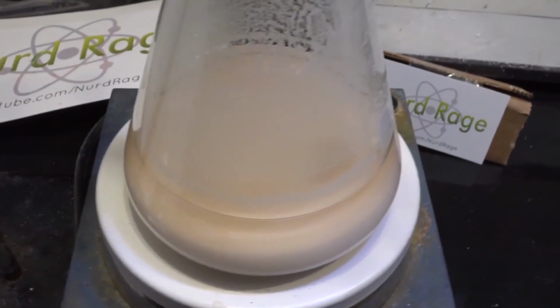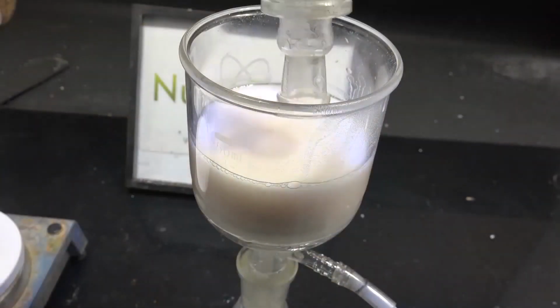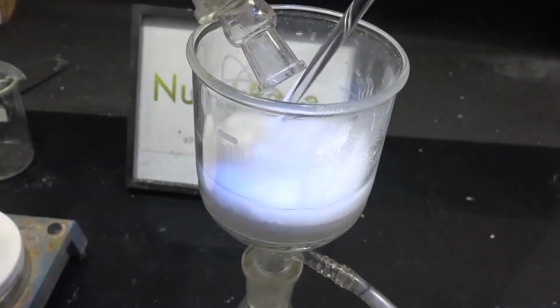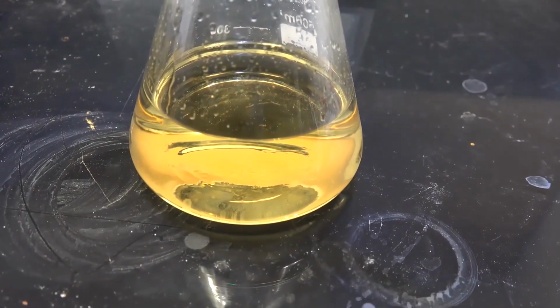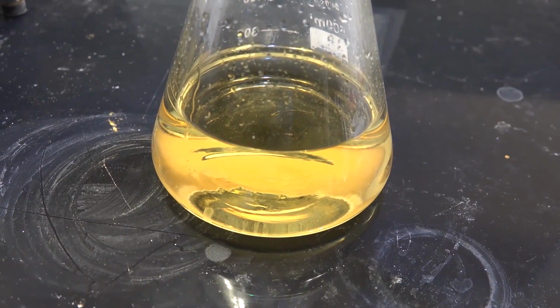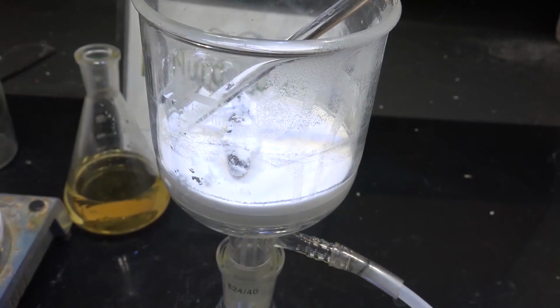And here we are after 24 hours and then letting it cool. Now we have to isolate our product. First we filter over this fritted funnel. To maximize recovery, we also wash the salts with acetone. Now p-chlorophenyl acetonitrile is clear, but our filtrate is orange from the impurities. Anyway, set the filtrate aside and move the fritted funnel to a new collection flask.